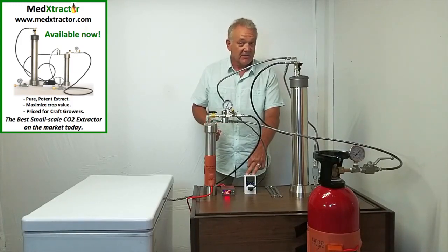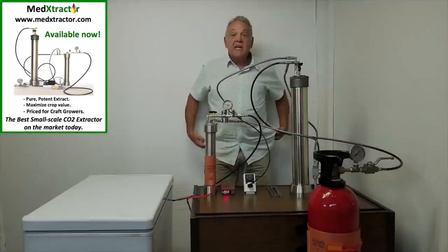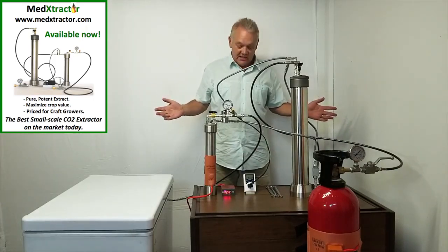At this point in time, the system is running nicely. We can leave. We're back — two hours and 25 minutes later.